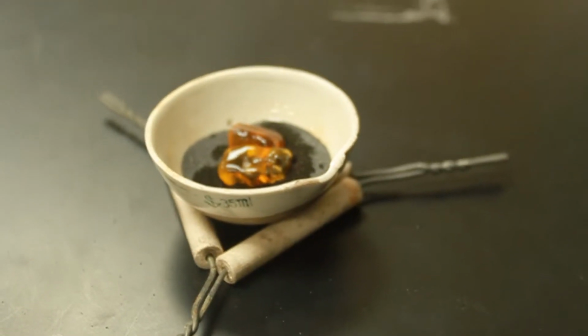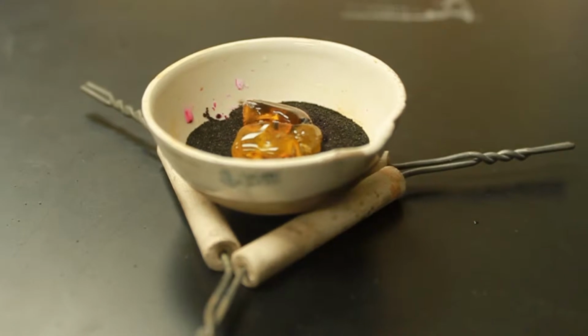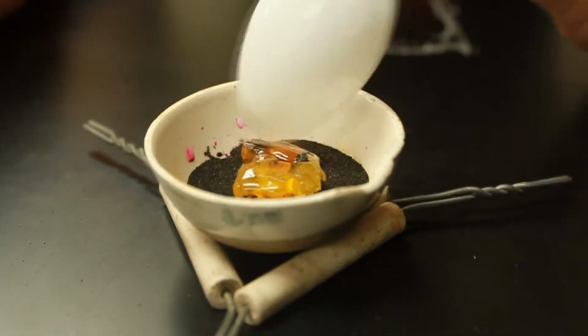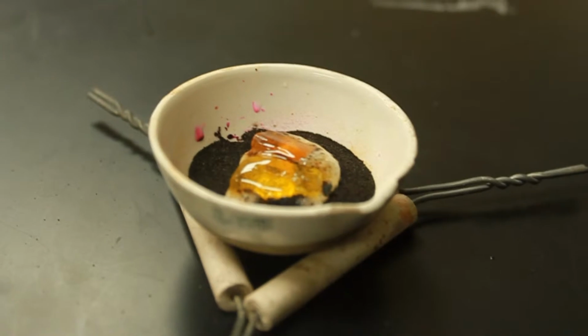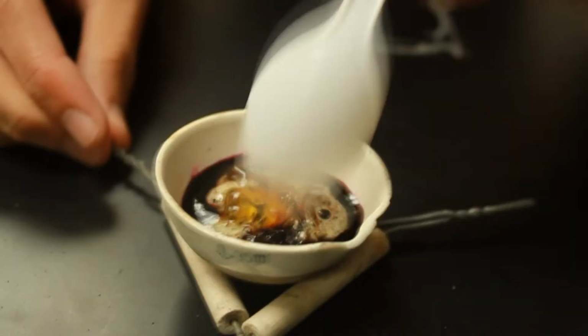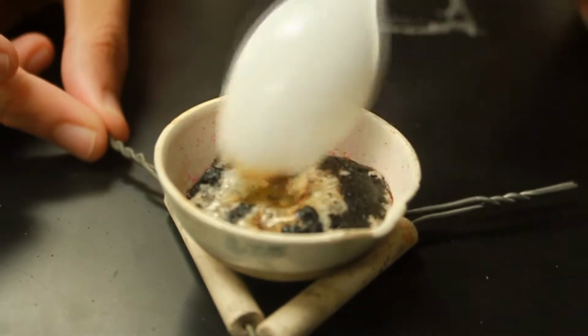I just watched a lot of YouTube videos. Are you using the ones we have? Yeah, the one on the bottom is there. Oops, bro. Ew, it's bubbling. It's bubbling. Look at the bottom.